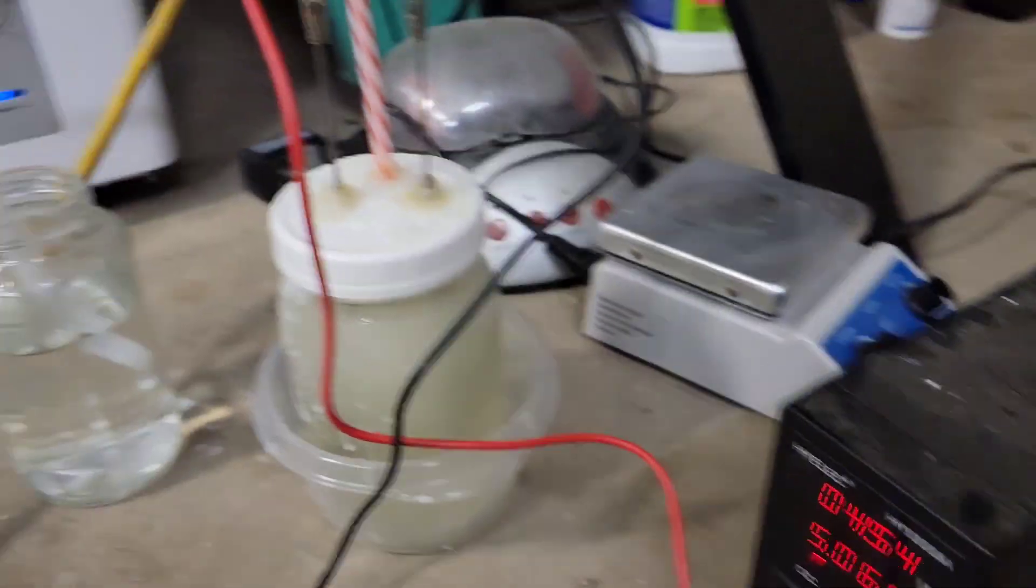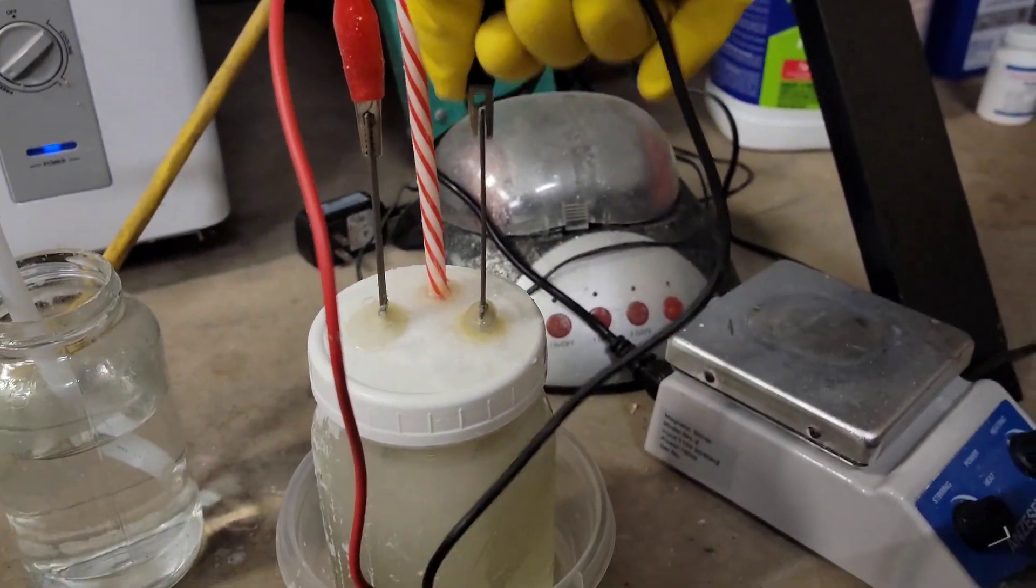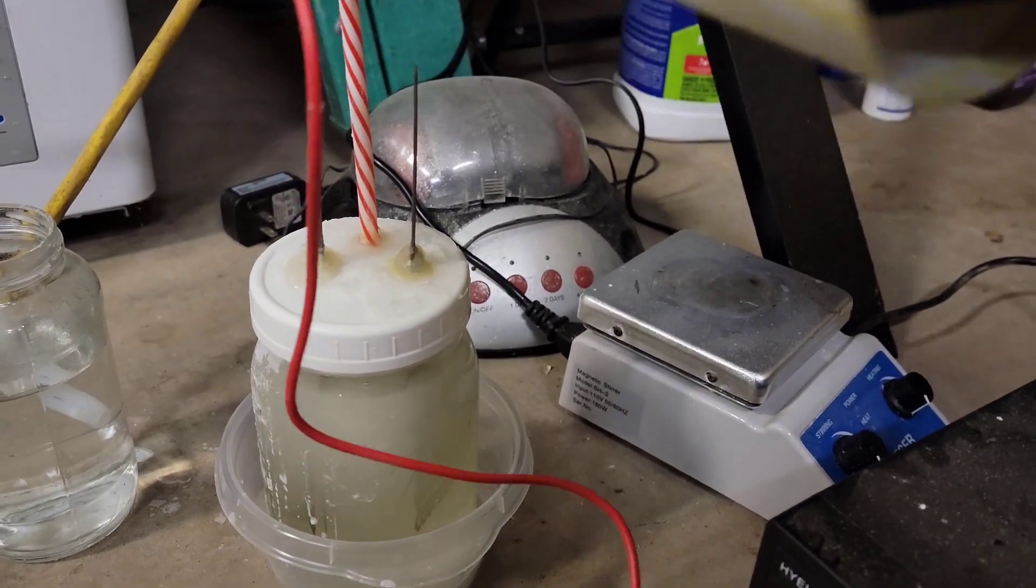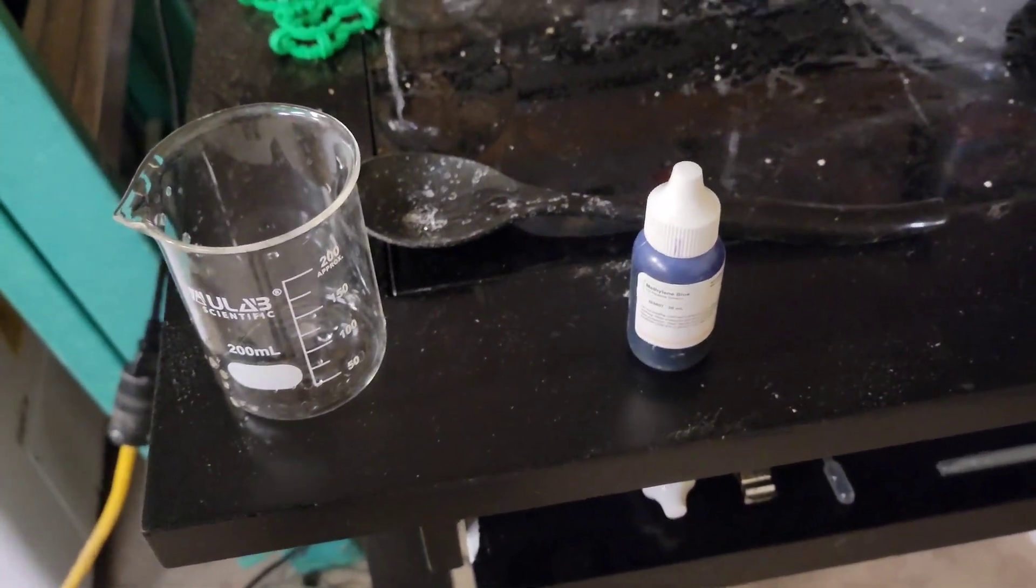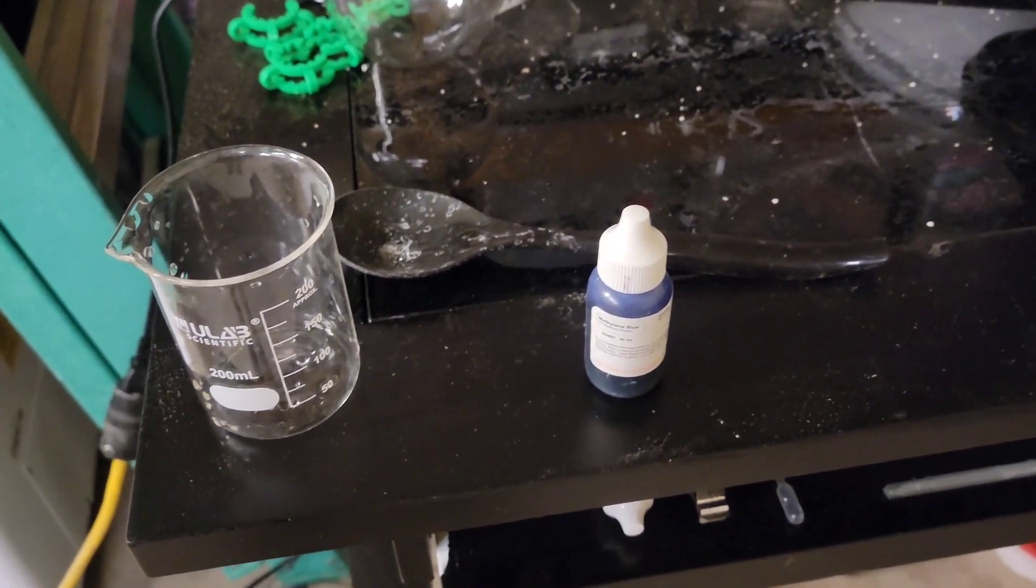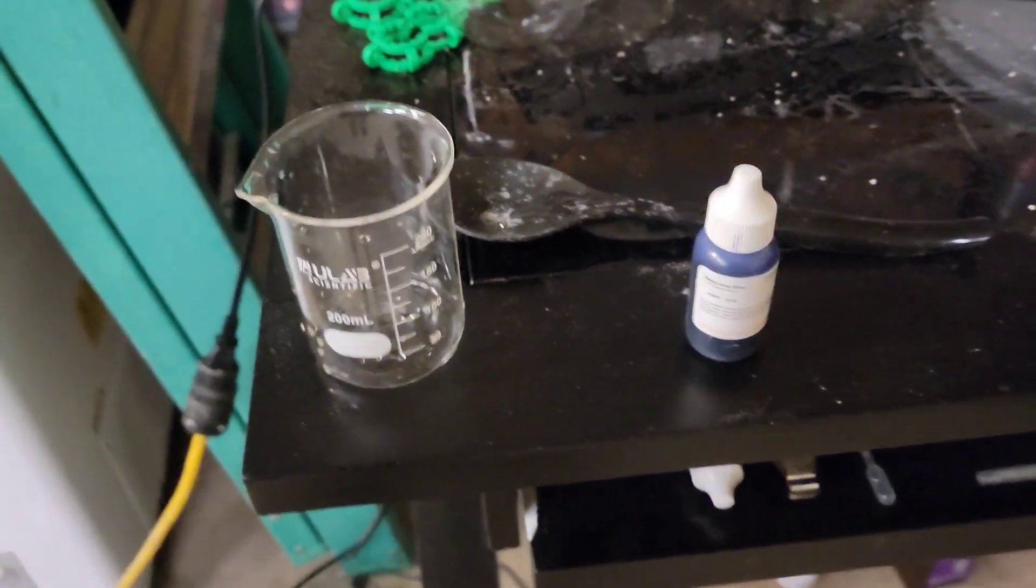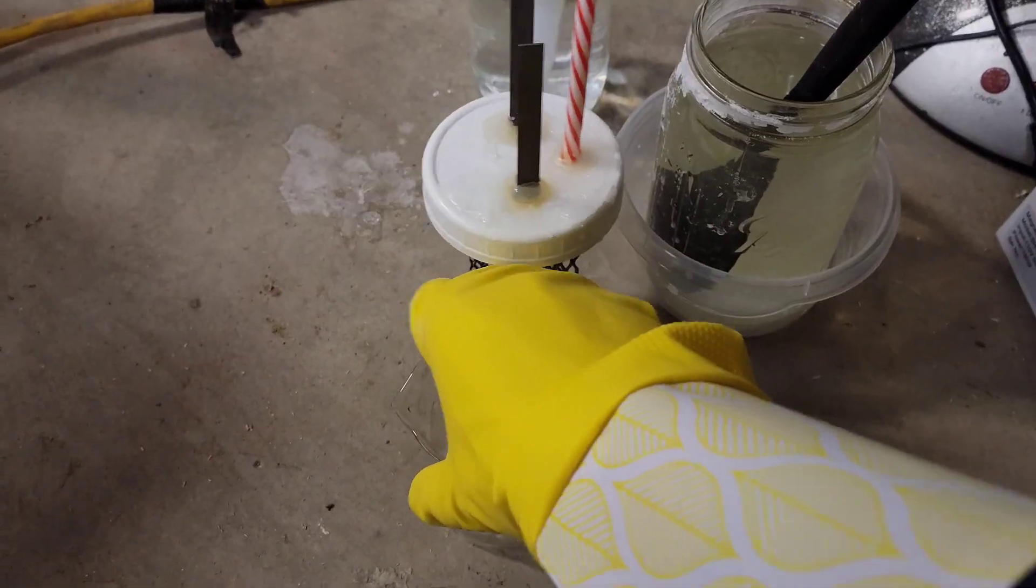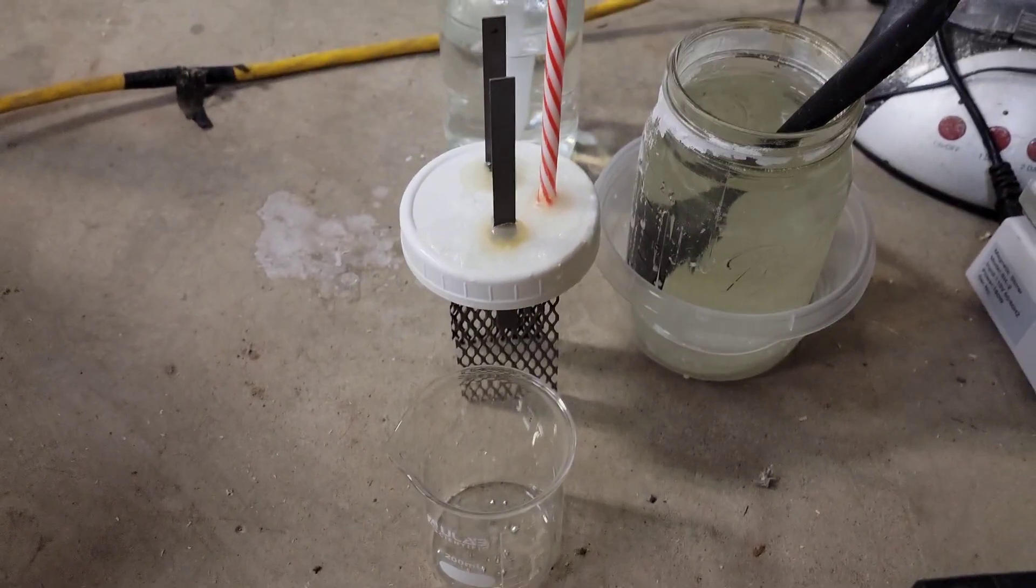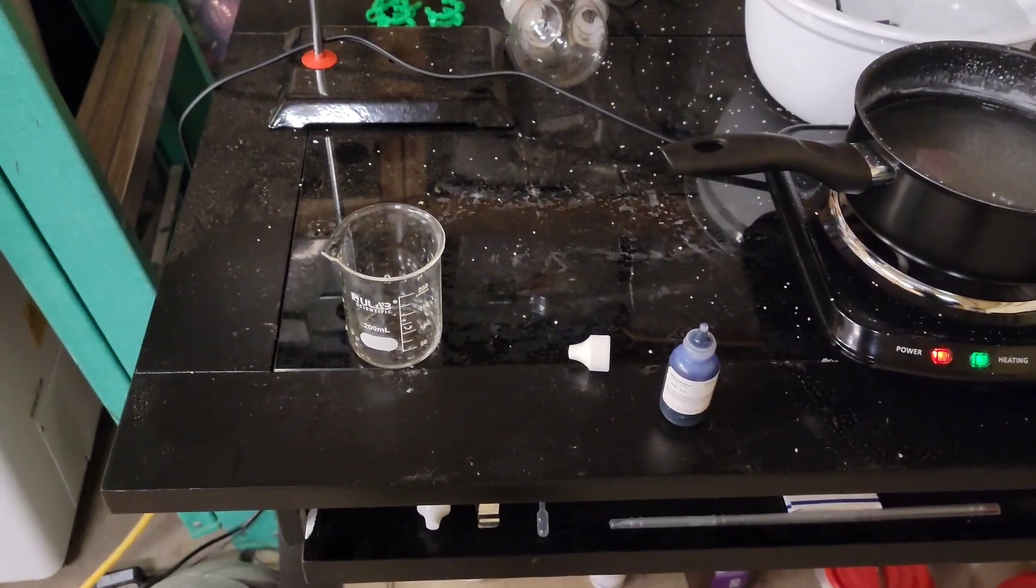So let's go ahead and turn that off. Okay, let's unplug these. And so now, got some methylene blue up here. Well, let's do the perchlorate test and see if it turns purple. If it turns purple that means it's been oxidized and it has perchlorate in it. If it stays blue then that means it's just chlorate still. Okay, got our spoon here. Now I'm just gonna go ahead and scoop a little bit into there. I'll probably do this off camera because it's pretty hard to scoop it in while holding the camera.